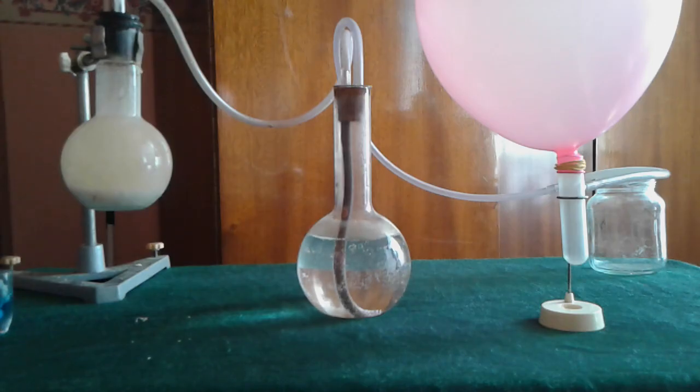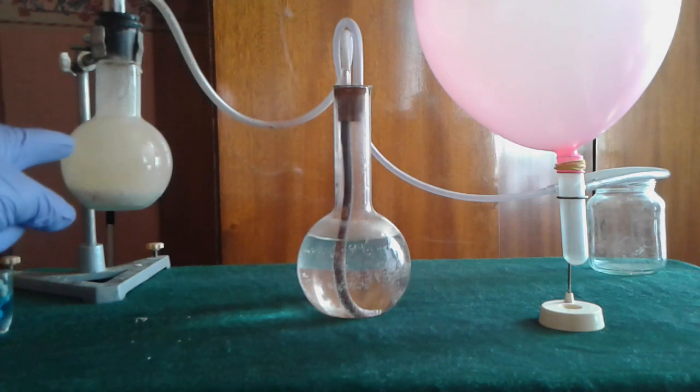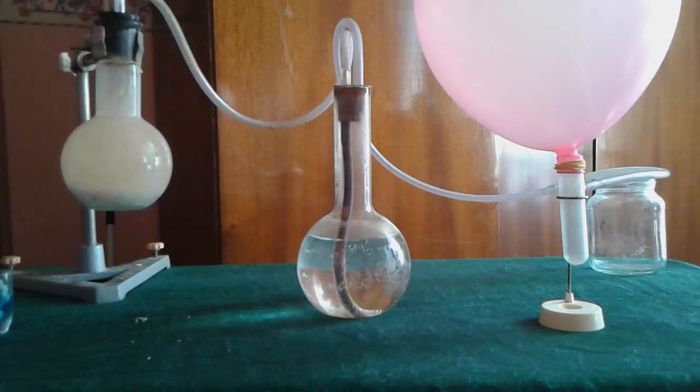Actually nitrous oxide is a colorless gas, but here it is mixed with water vapors and it looks cloudy.